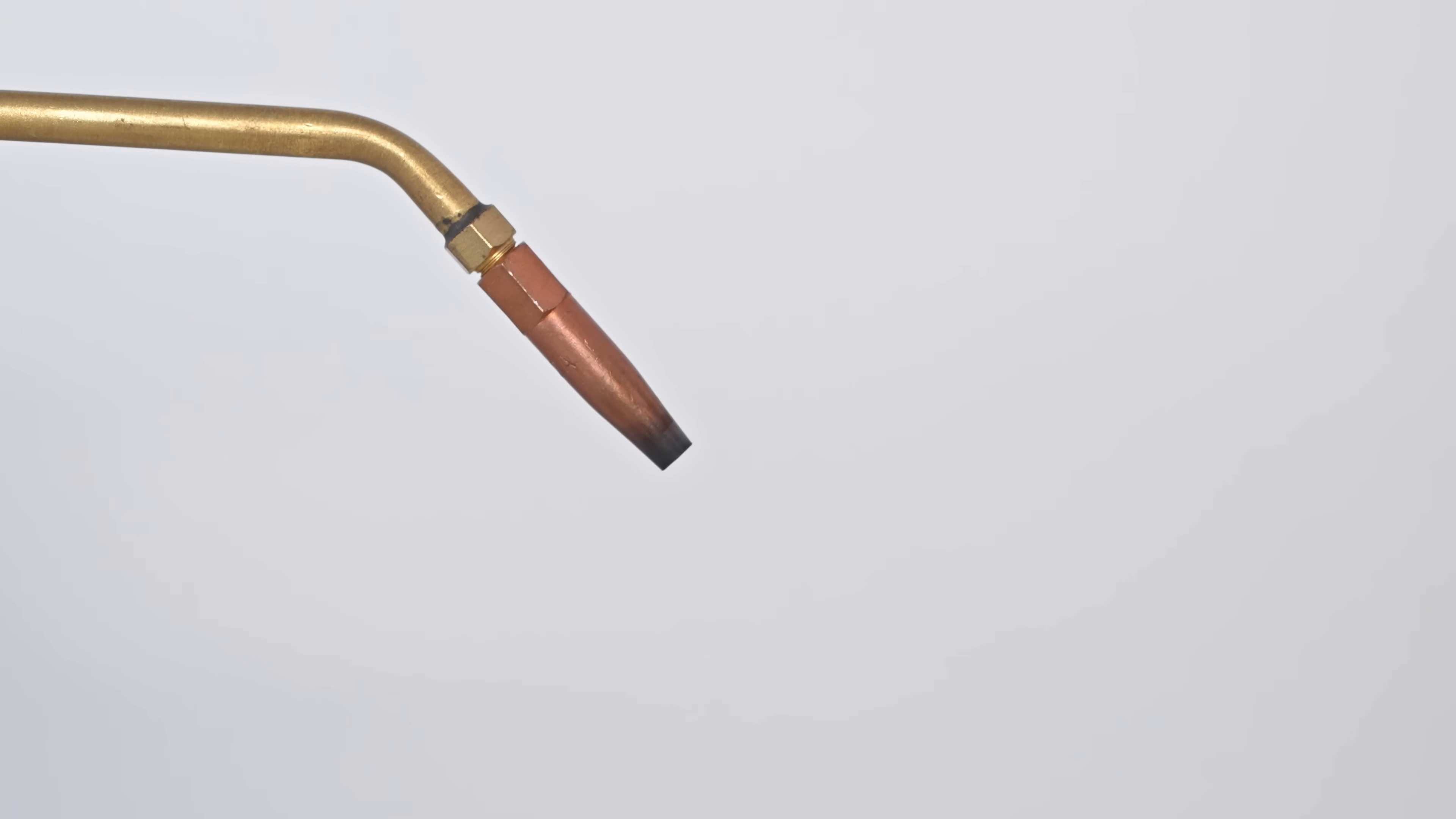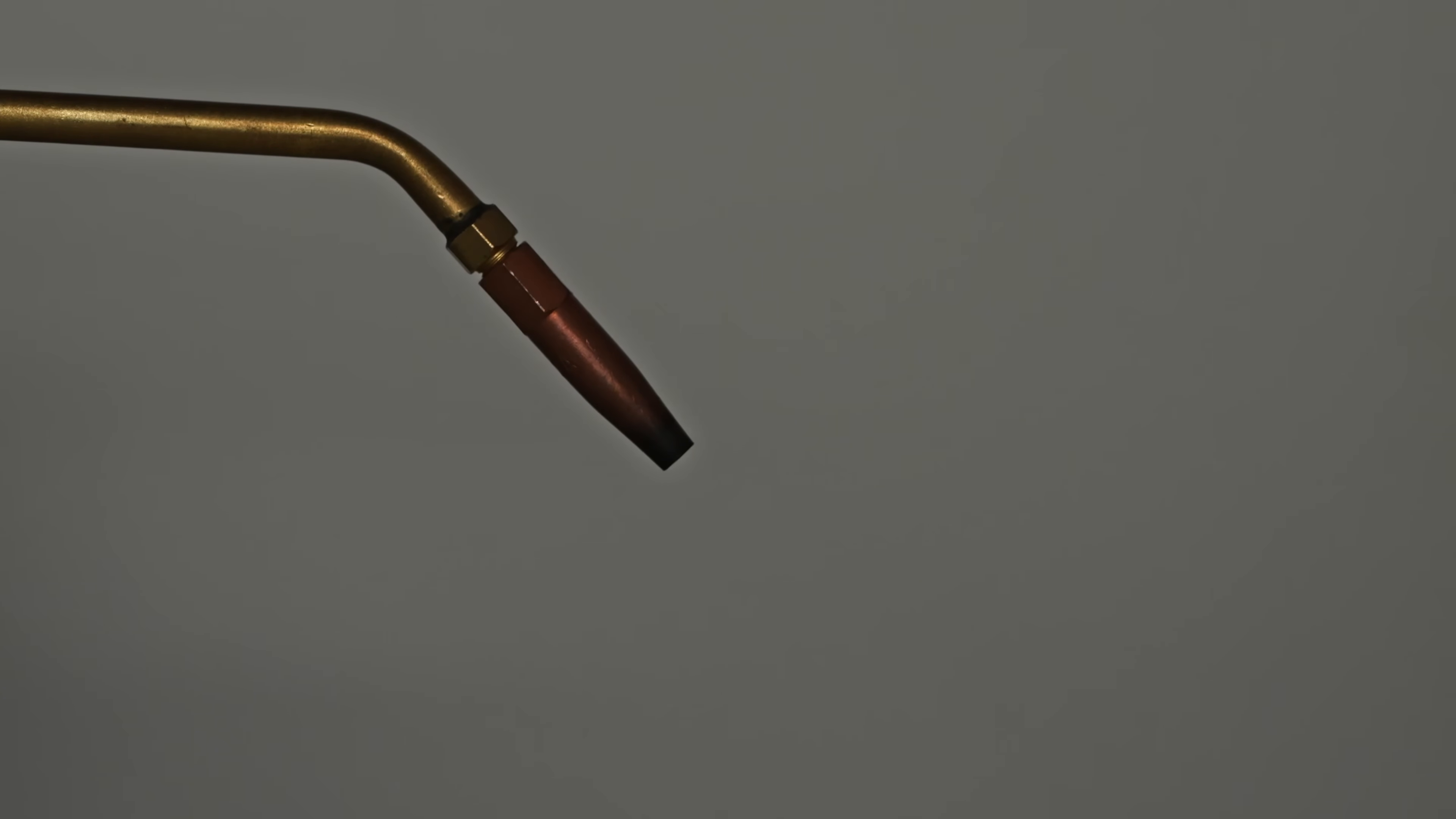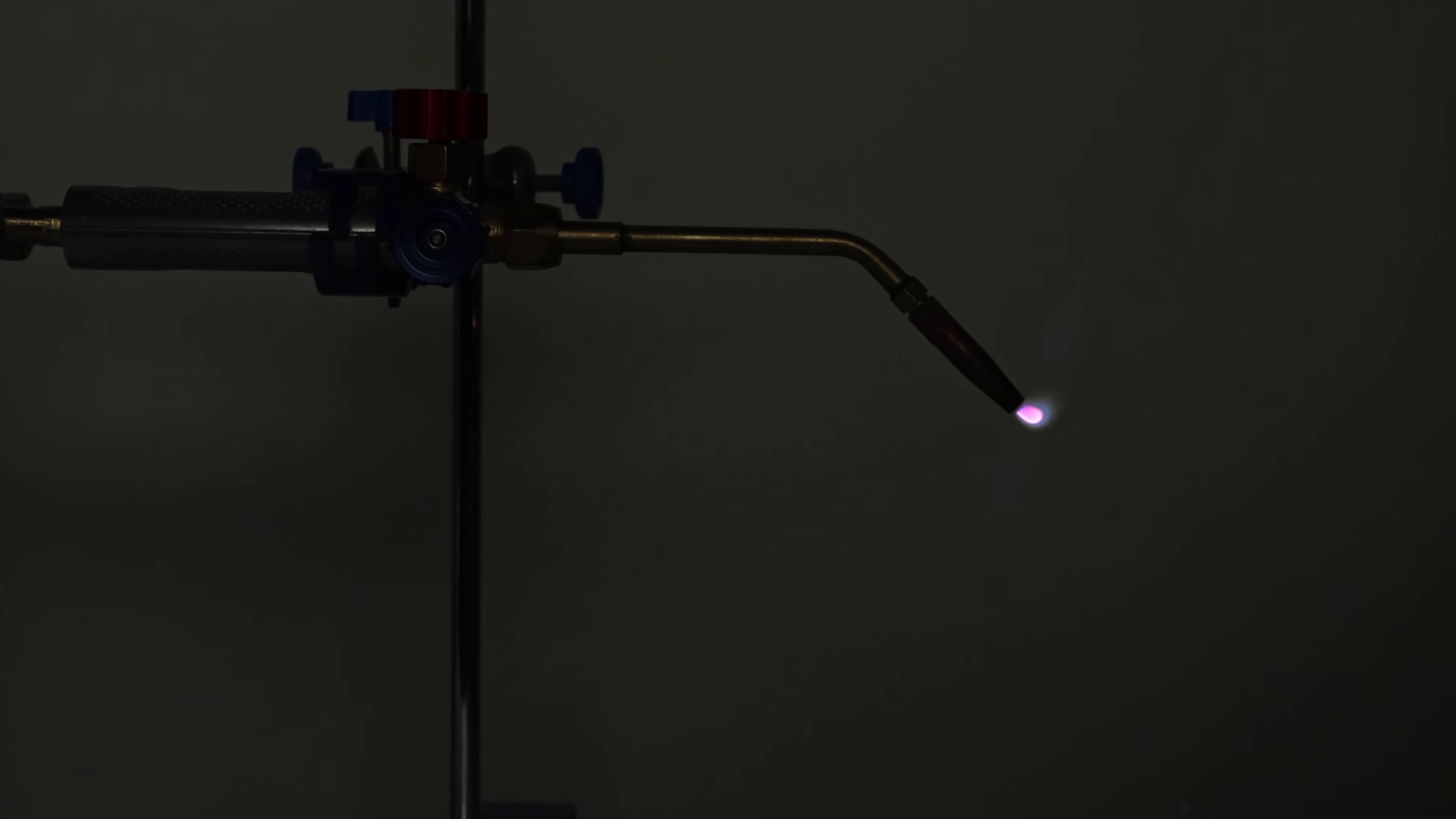Now, let's try to ignite the cyanogen. I dimmed the light so that the color of the flame of the burning gas was better visible. Yes, it worked. The cyanogen burns with a rich pink flame, but the flame is too small. To achieve more intense combustion, the intensity of the gas release needs to be increased.